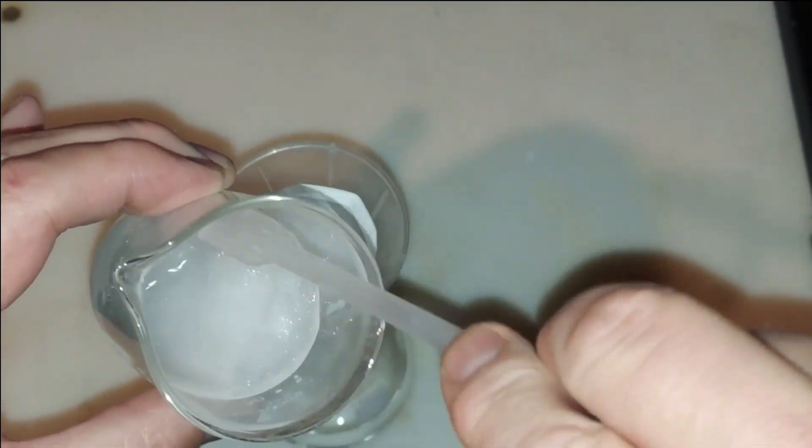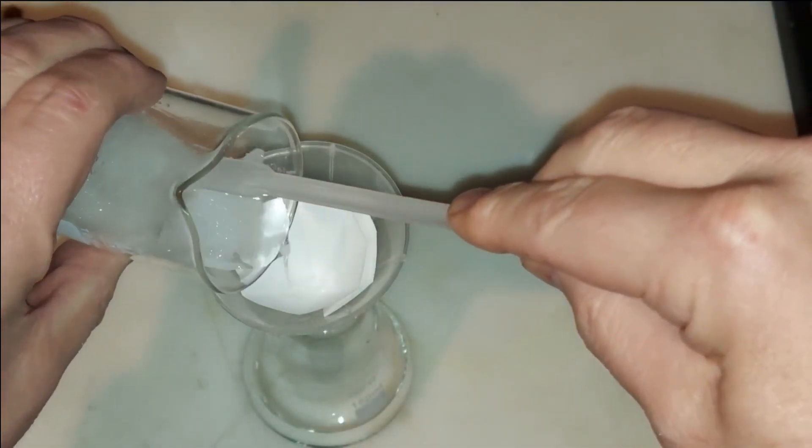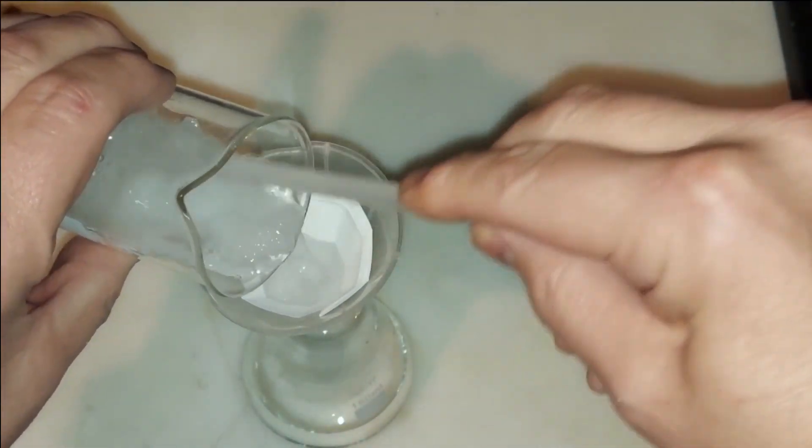I mentioned earlier that this stuff is like ice in water. It kind of reminds me of that slush, slush in water.